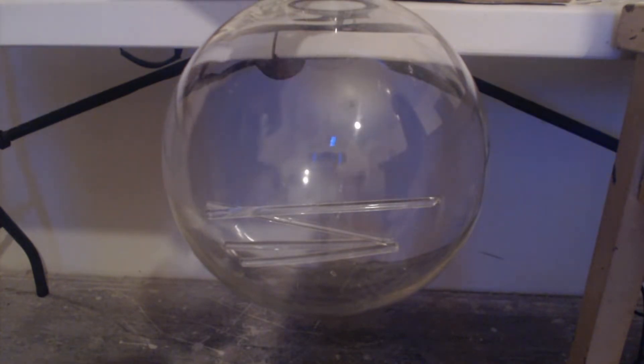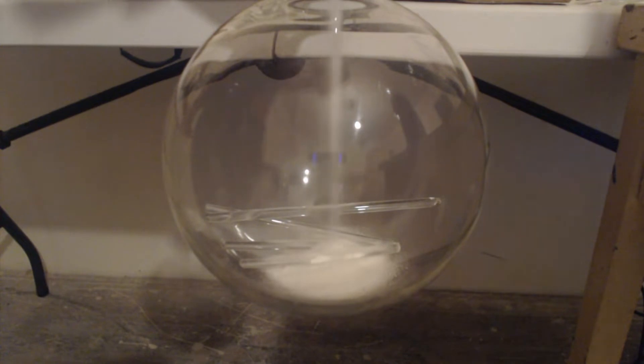So I already made a video about how to make fuming nitric acid. This time, my yield in the first video was about 50%. This time it's going to be about 93% or 95% or something like that. I've got a 2,000 milliliter round bottom flask with some stir rods in there as boiling stones. I'm going to add into it 303 grams of potassium nitrate, stump remover.